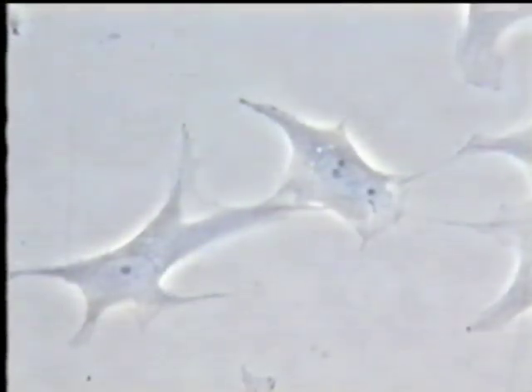Doubling time for all these cells is 48 hours. As the experiment only lasts 24 hours, very few dividing cells are yet present. We shall not show any among normal cells, and cancer cells will be destroyed by PB100. The cells by themselves are in no way fluorescent under ultraviolet radiation; they can only be seen using visible light. In contrast, the path of PB100 may be easily followed because of its yellow color under visible light and blue natural fluorescence under UV.